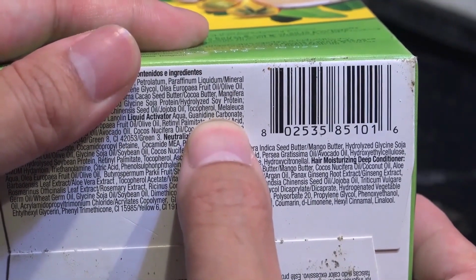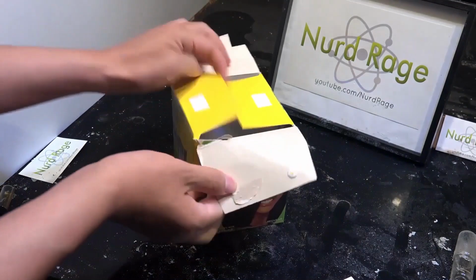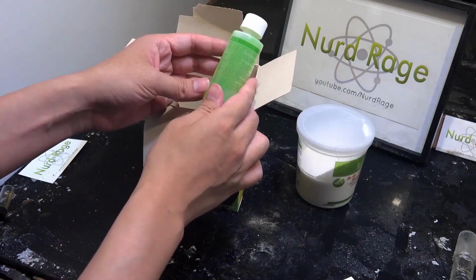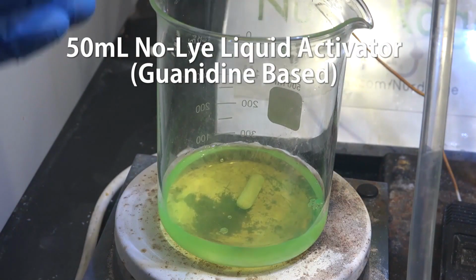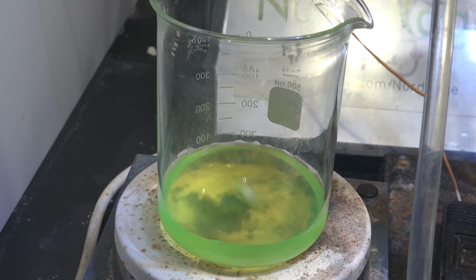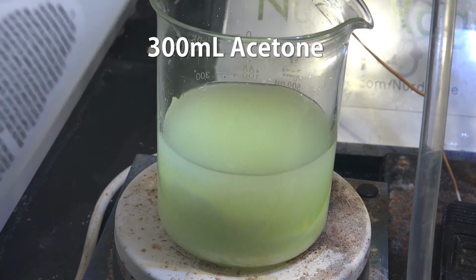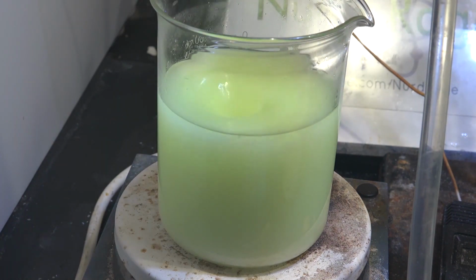so we're going to have to run a few purification steps to get our guanidine. There are actually a lot of extra products like activators, shampoos, and washes, but we just want the component that has our guanidine. And here it is, the liquid activator as it's called. Pour all of the liquid activator into a beaker. The guanidine is all dissolved in solution, so to precipitate it out, we add 6 times its volume of acetone. As we add it with stirring, the guanidine carbonate precipitates out as it is insoluble in acetone.